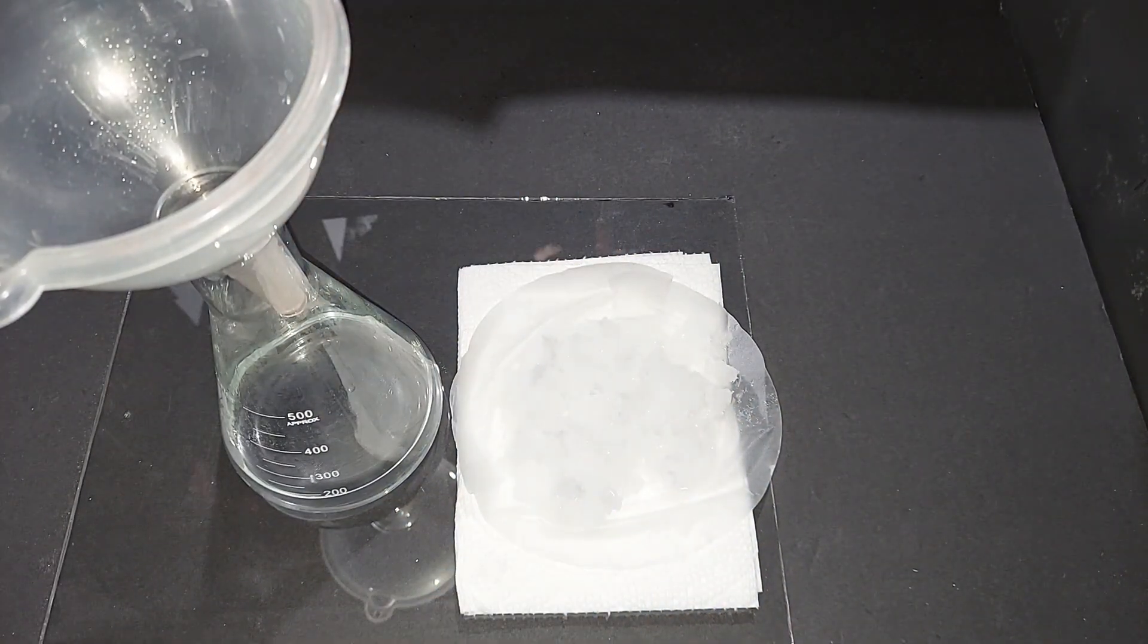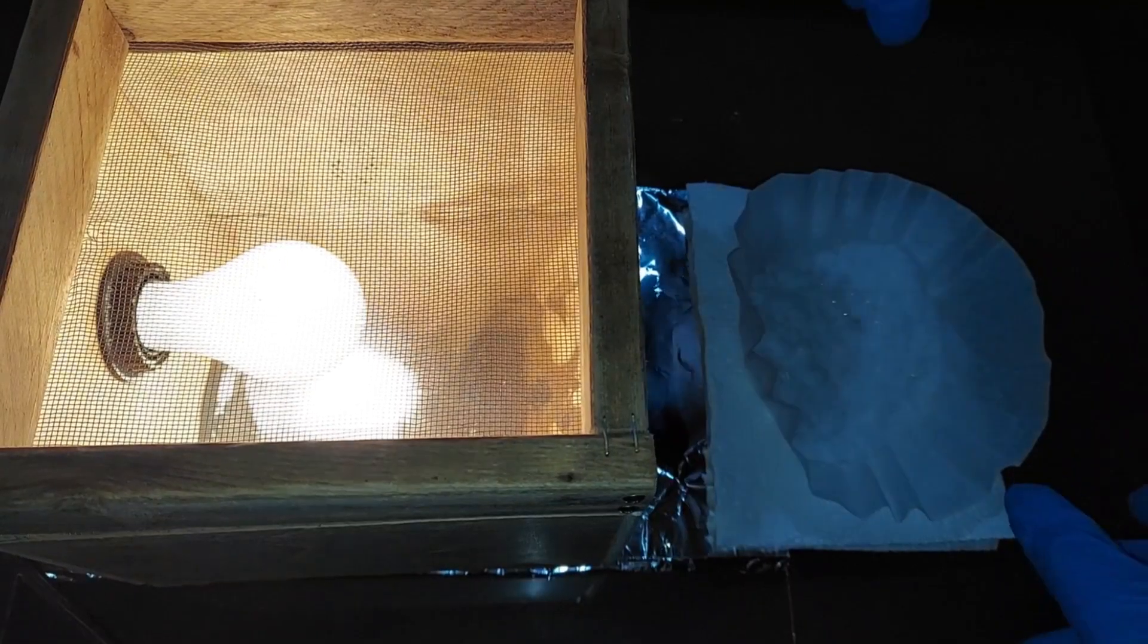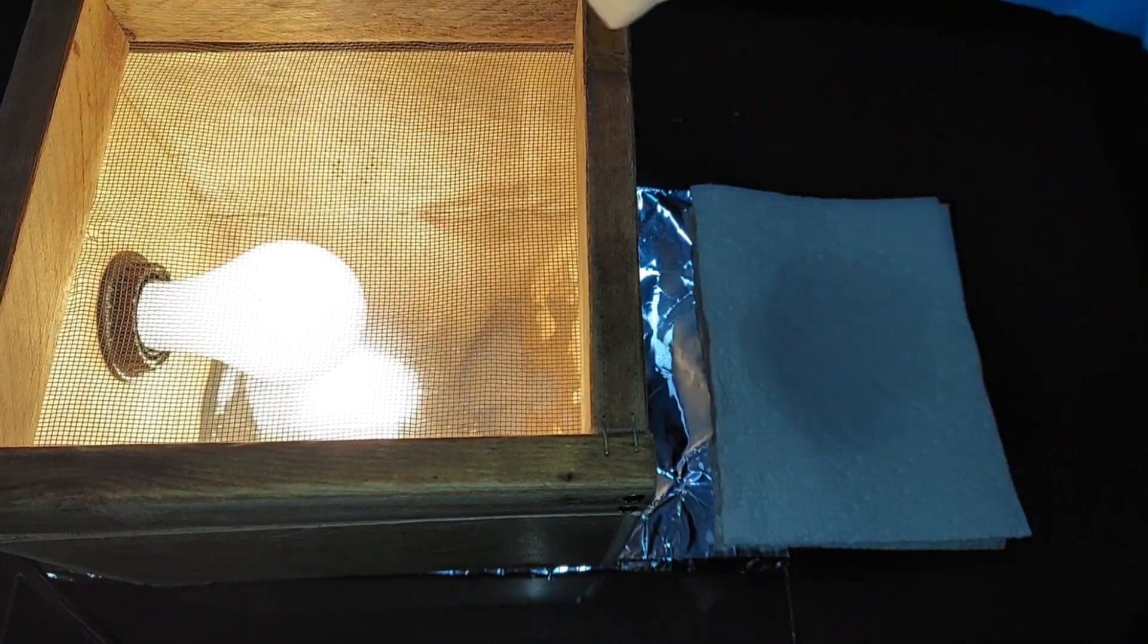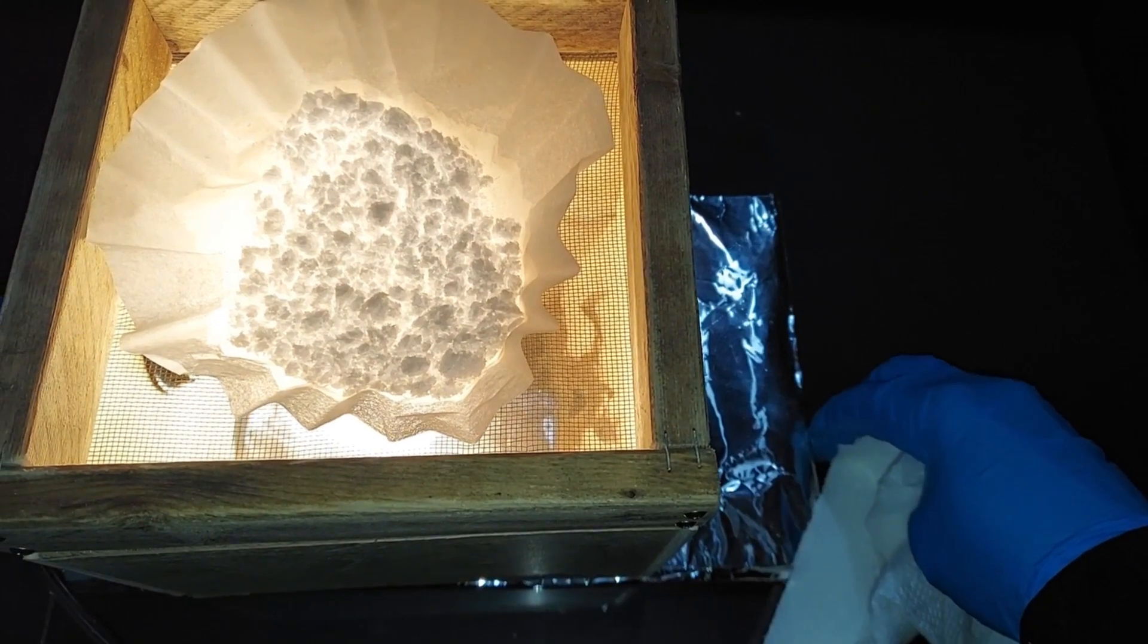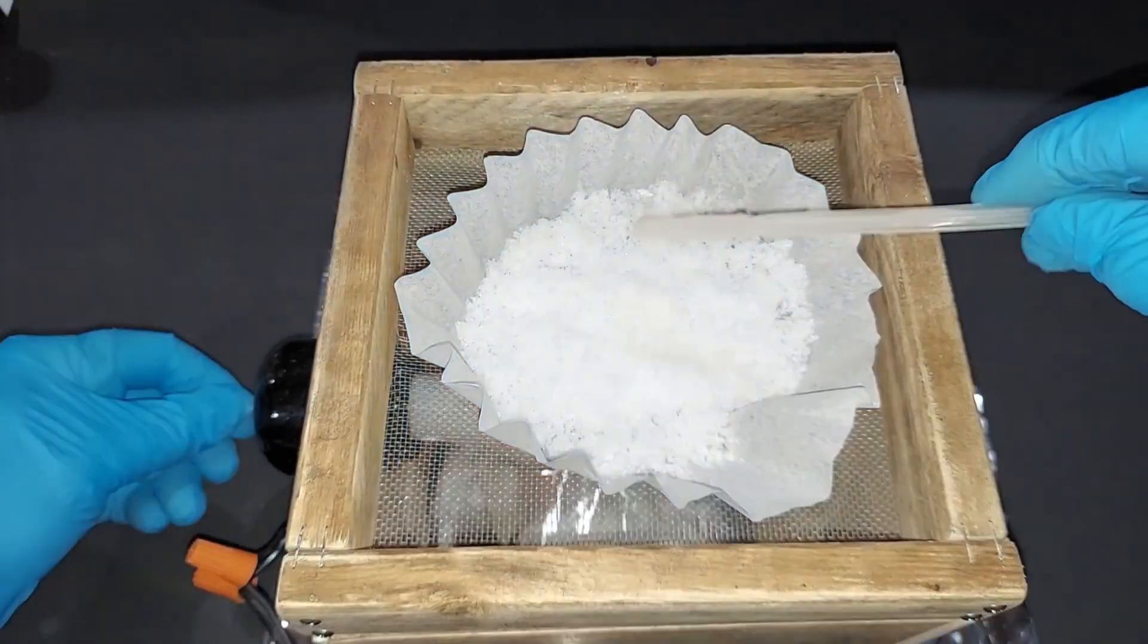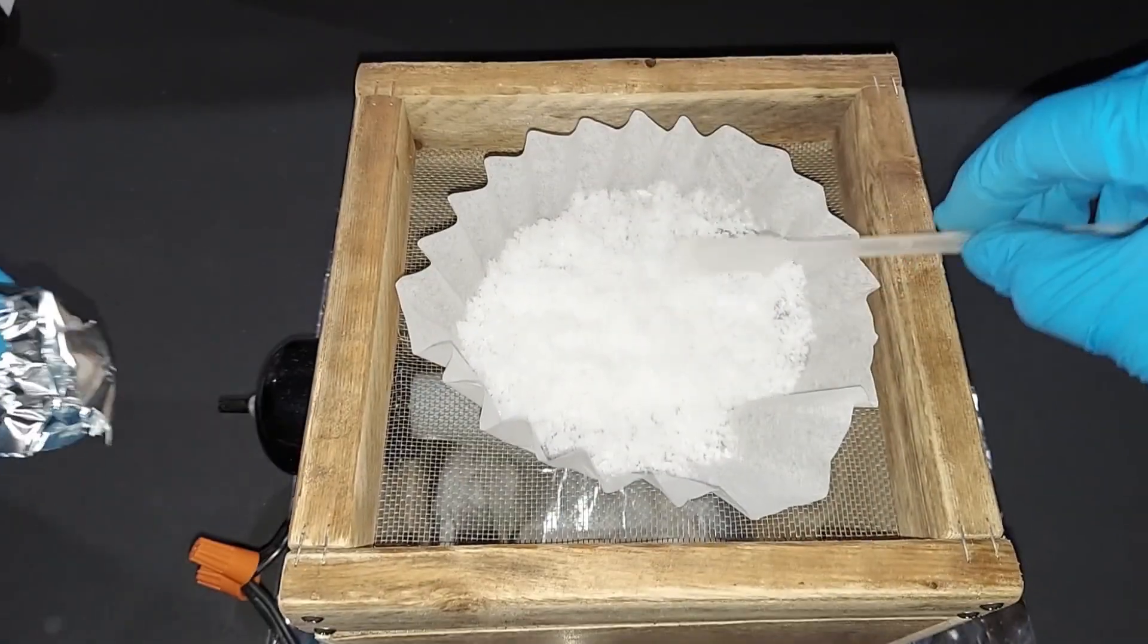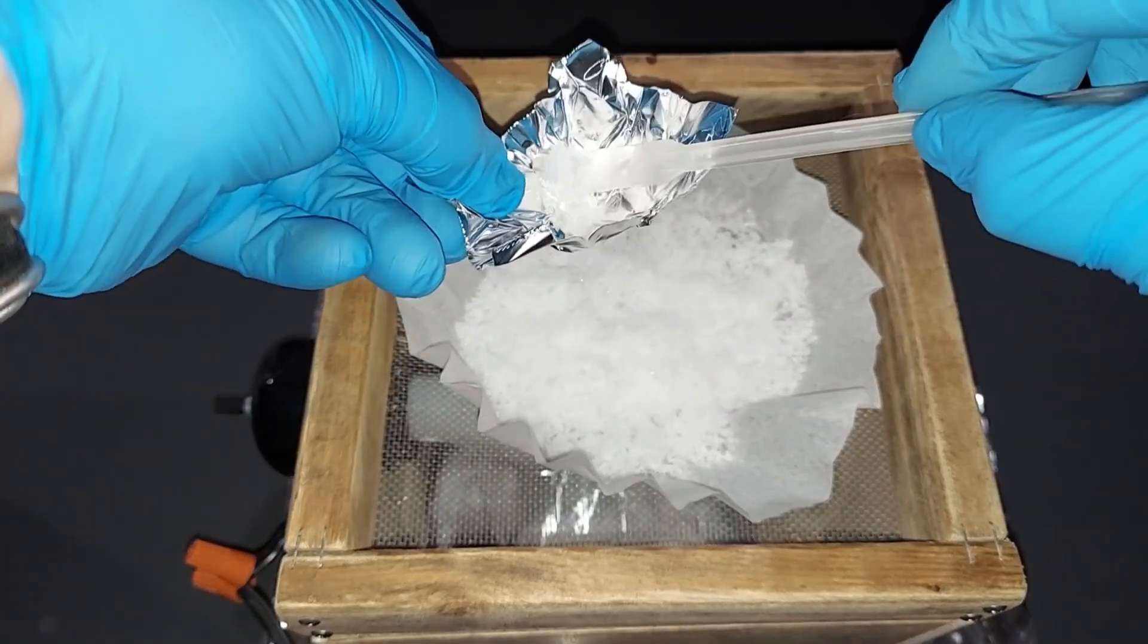All right, from here I'm gonna put it on the light bulb heater and we'll just wait until this stuff dries up. All right, a couple paper towels later it's dry enough. I'm gonna lift it up now and put it on this light bulb heater here where it will remain until it dries. Okay, it's dry completely. It's crusty dry actually. So I'm gonna go ahead and turn this off here.